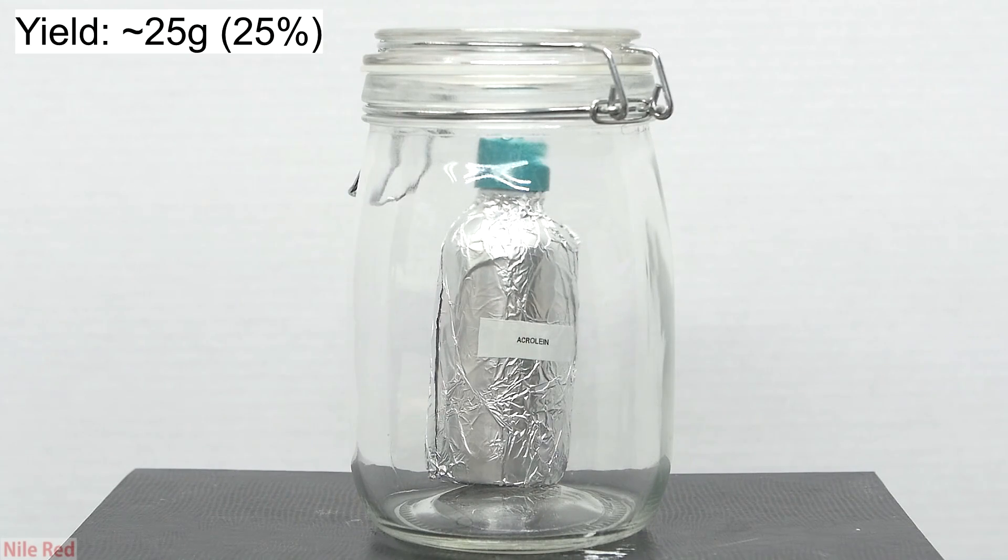The final yield that I got was about 25g, which corresponds to a percent yield of about 25%. The procedures that I was following did this on a much larger scale, and their yields varied between 30 and 50%. Considering this was done on a small scale, I think the yield is okay, and in the end I got way more than I actually need.